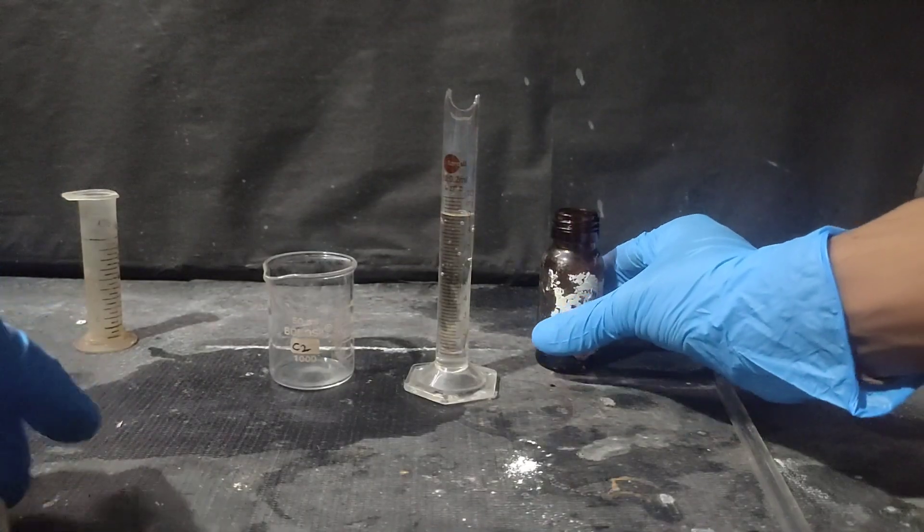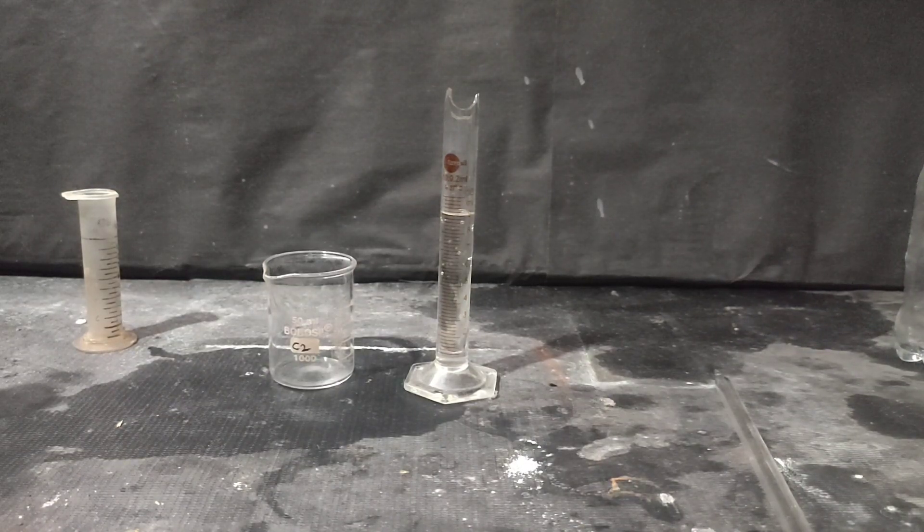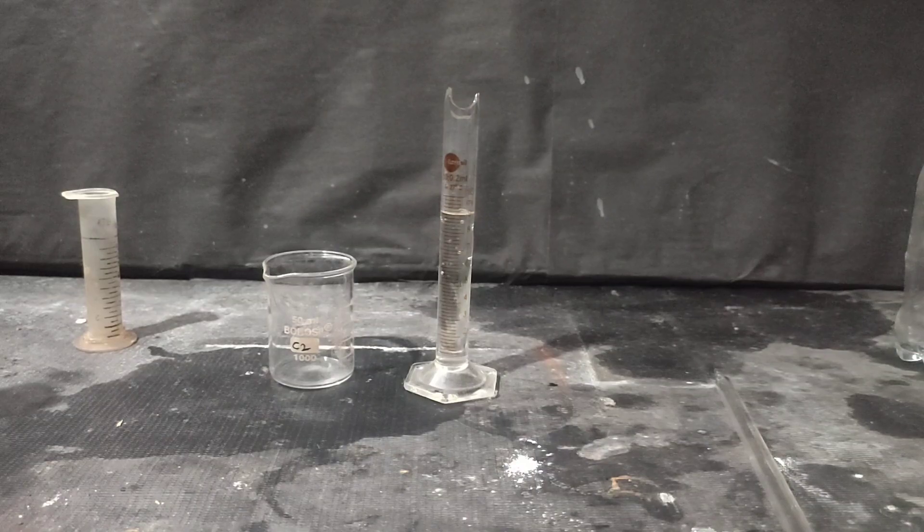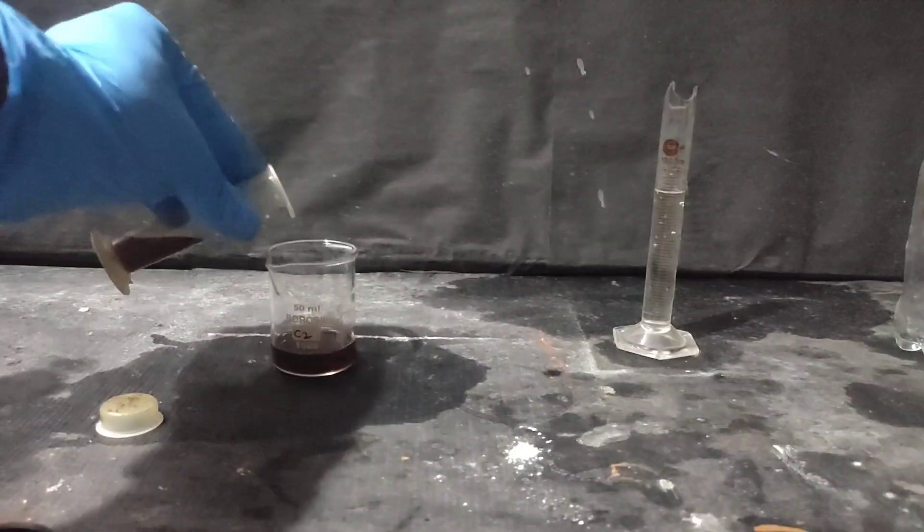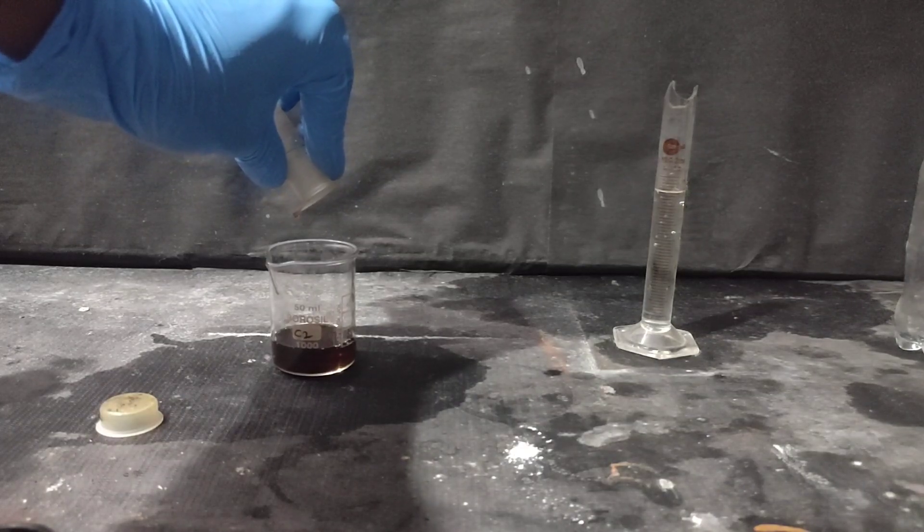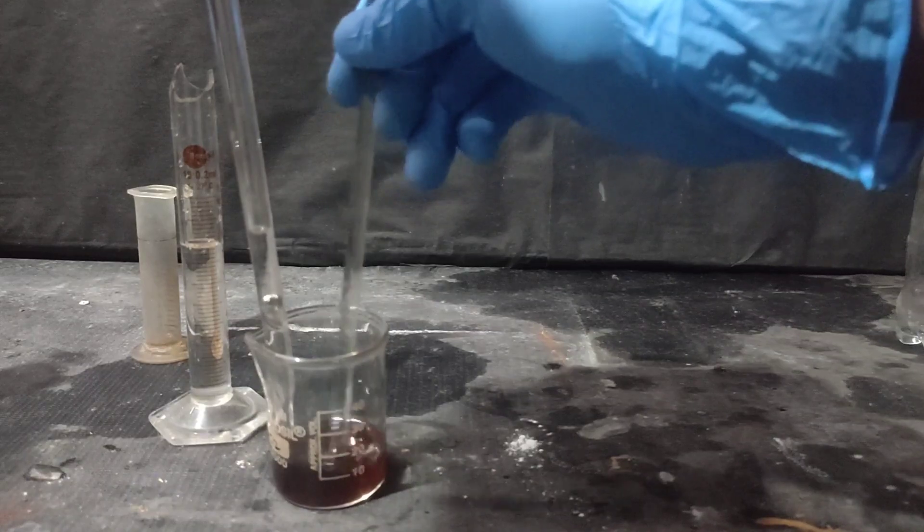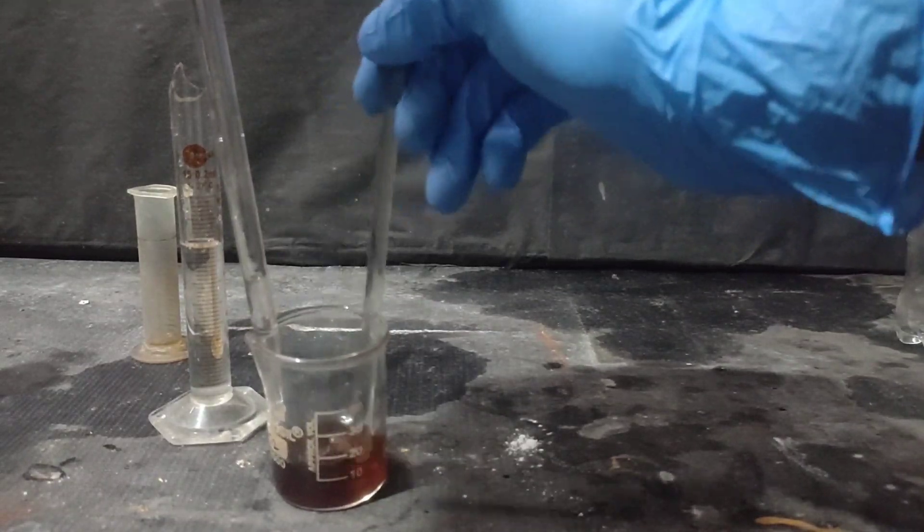First, I have to make nitrating mixture. For that, I am taking 9 ml of concentrated nitric acid and 13 ml of concentrated sulfuric acid. I started adding nitric acid slowly to concentrated sulfuric acid drop-wise with constant stirring.